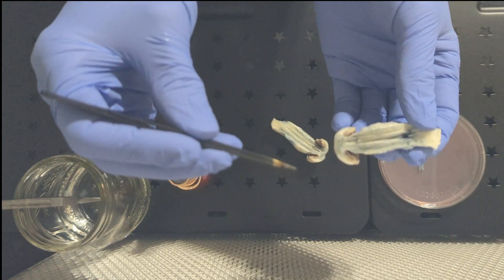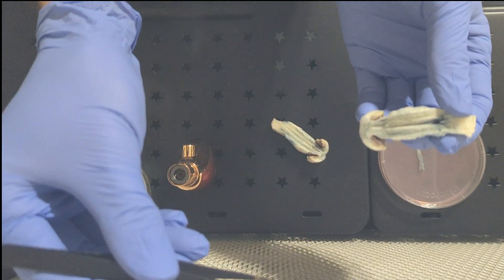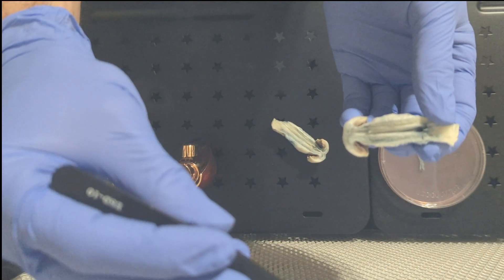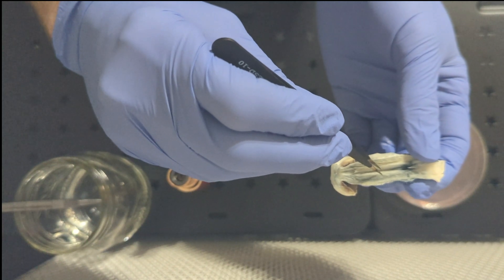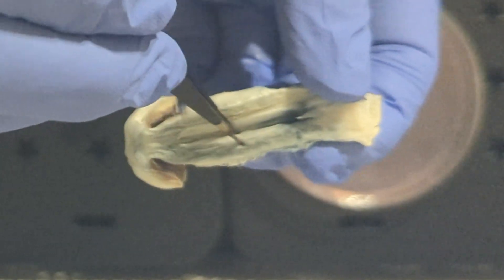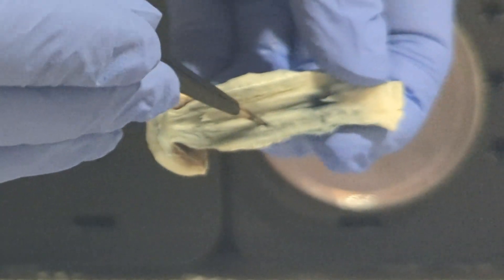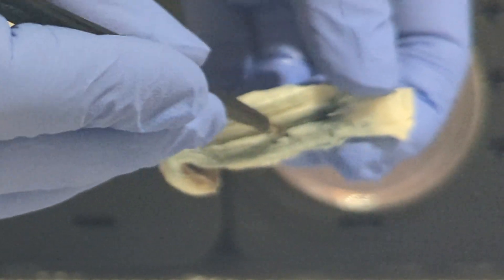Some expressions can be caused by environmental conditions and/or contamination and are likely not to transfer by cloning. The only way to be sure is to try cloning it and grow it out.